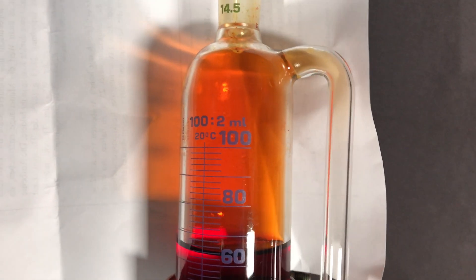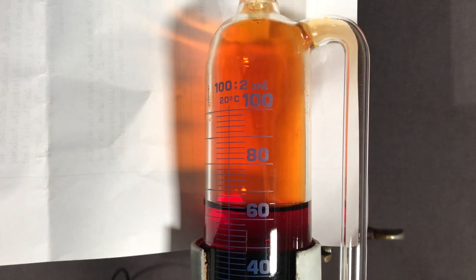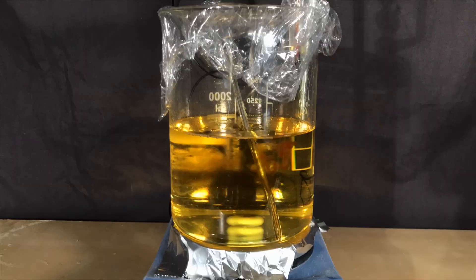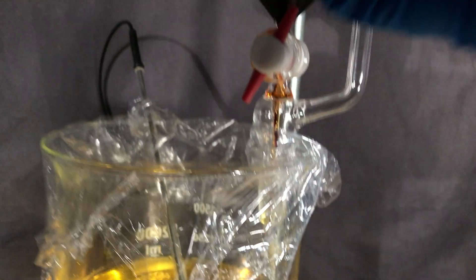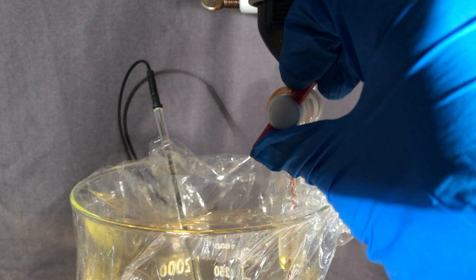By the way I used 54 milliliters of bromine and you can see that there's still water on top but the small amount of water dissolved in the bromine shouldn't matter. Before the water enters the vanillin solution we are simply going to close the funnel.